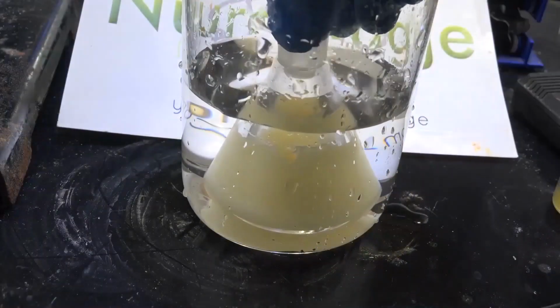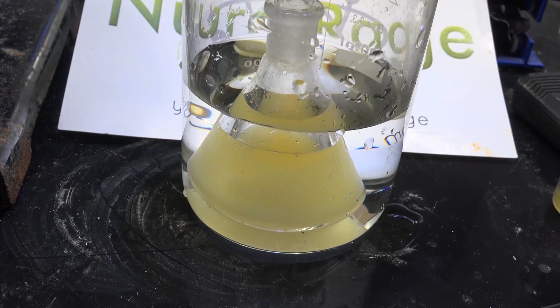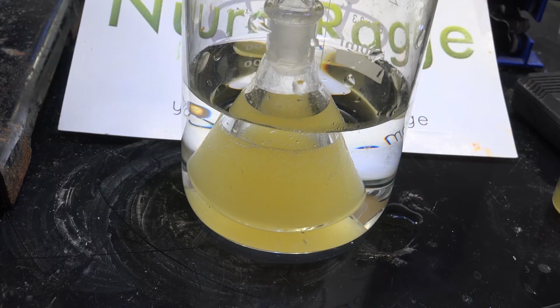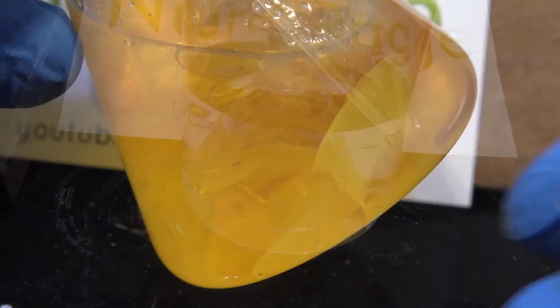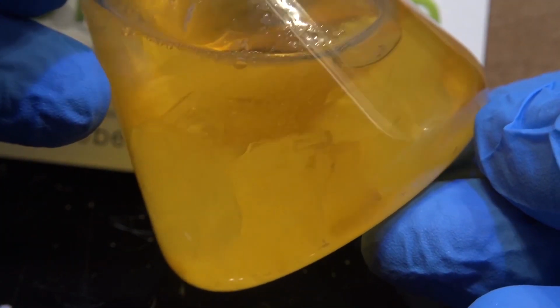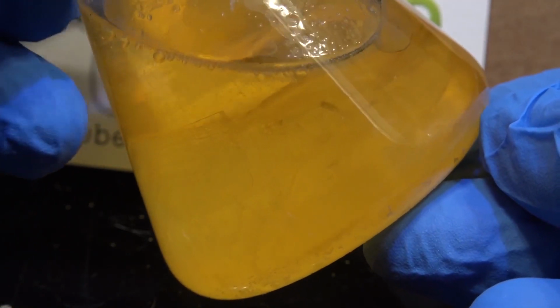To get even higher purity, we first remelt the product in hot water, and then we set aside the crude liquid p-chlorophenyl acetonitrile in a room at 18 degrees Celsius and let it sit. A precision temperature controlled cooler is best if you have one. It will very slowly crystallize. Unlike the tiny crystals from putting it in a refrigerator, these very large crystals are much better at excluding impurities.